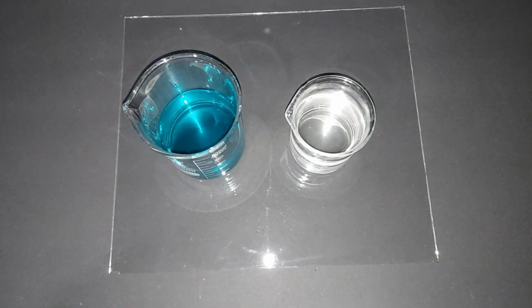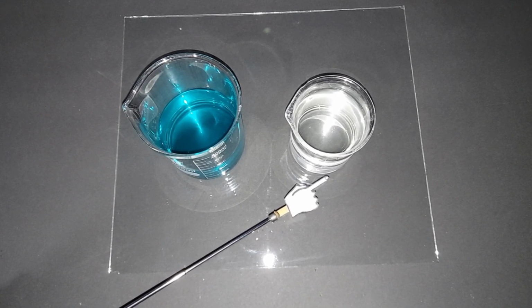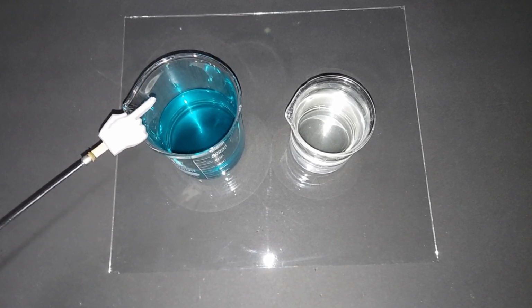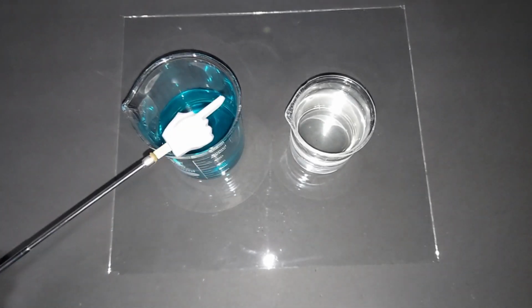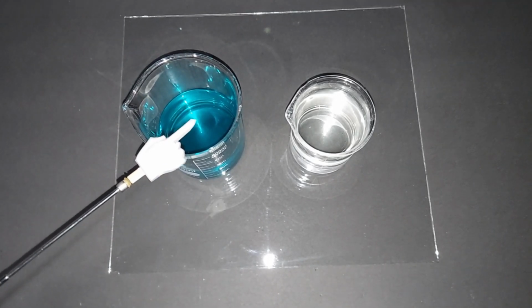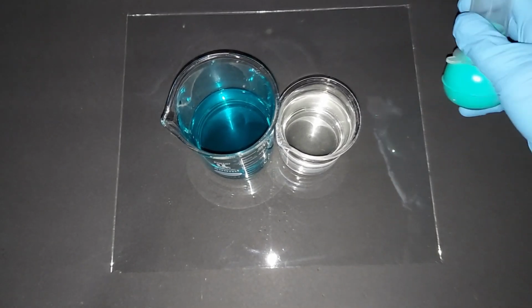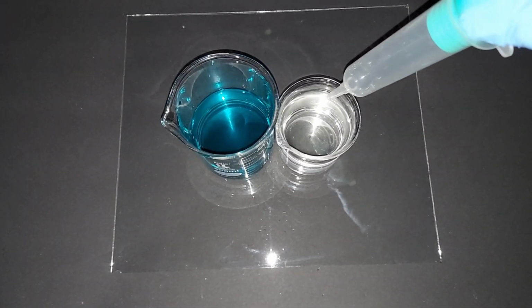We're all set up here for the final step. I dissolved that 30 grams of sodium carbonate into 250 milliliters of water here. As I said, I transferred the 250 milliliters of the copper acetate solution to this 500 milliliter beaker. So essentially, we're just going to get this into here slowly. It's going to fizz and pop because it's an acid and a base, of course. And eventually, though, we should see our final copper carbonate fall out of solution. Instead of pouring it in, I'm going to do it in small amounts just so that we keep the bubbling, because we're mixing an acid and a base, to a minimum.